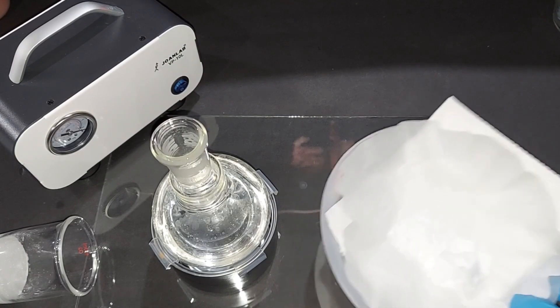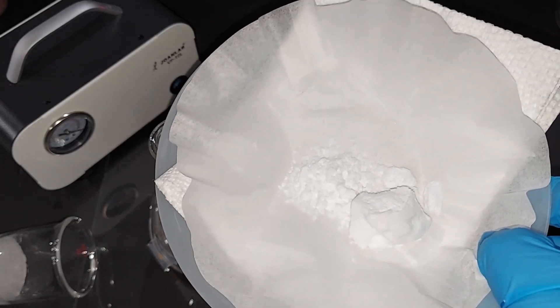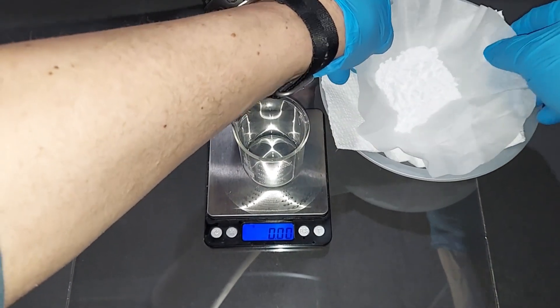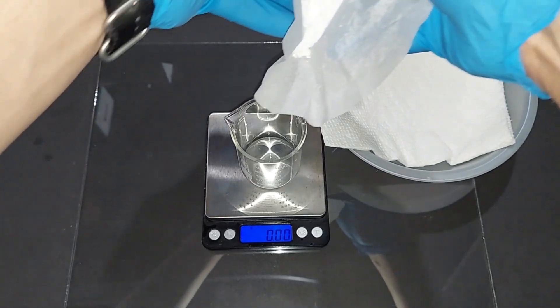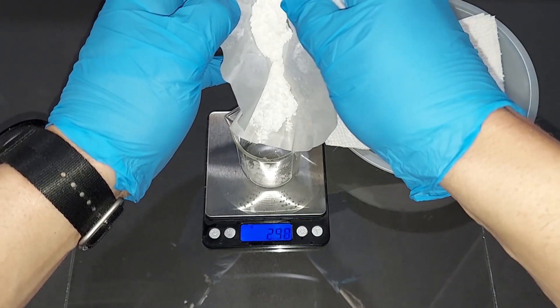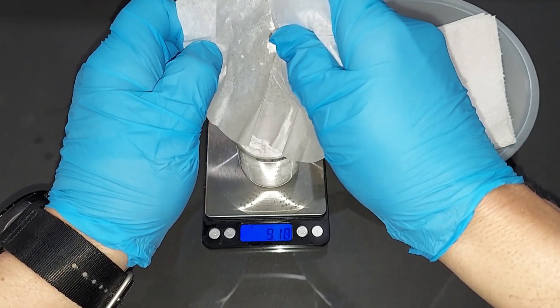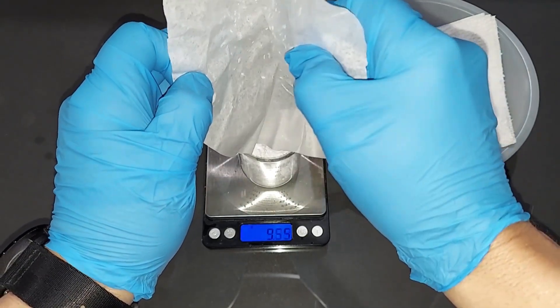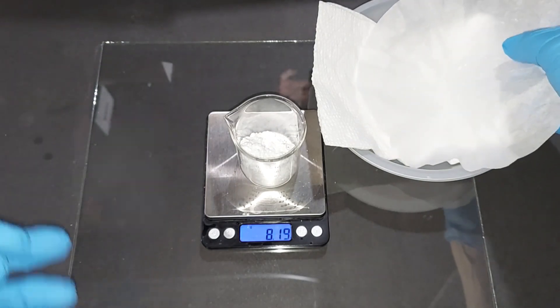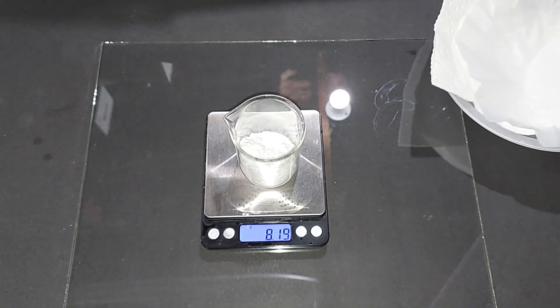Okay, we now have our final product of the HDP. I'll be back when it's completely dry. The HDP is done drying and I am going to now weigh it. I'm hoping for a yield somewhere around 10 or 11 grams. I have not done this yet. I have no idea if this is going to even get in there properly. Looks like it now, yeah okay.